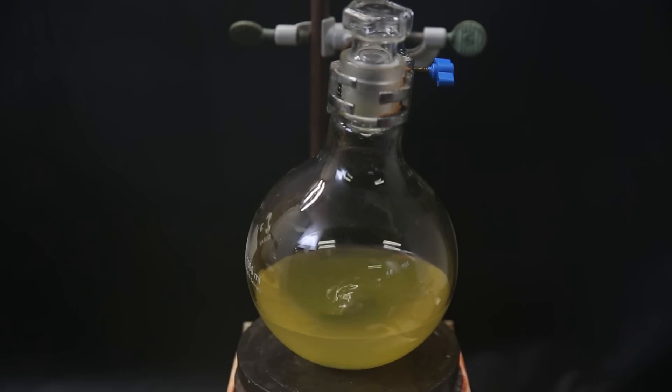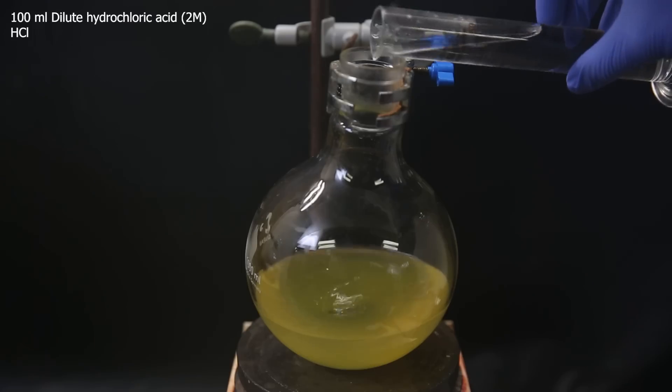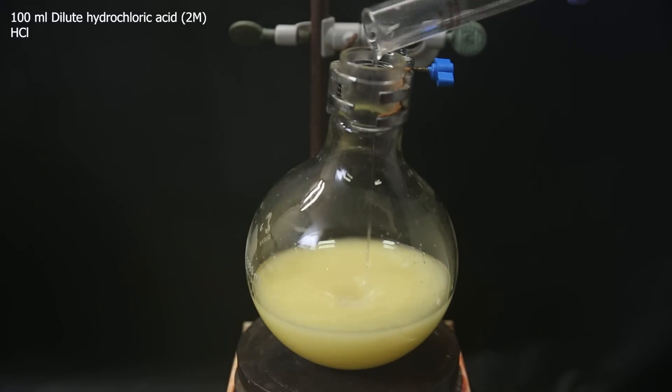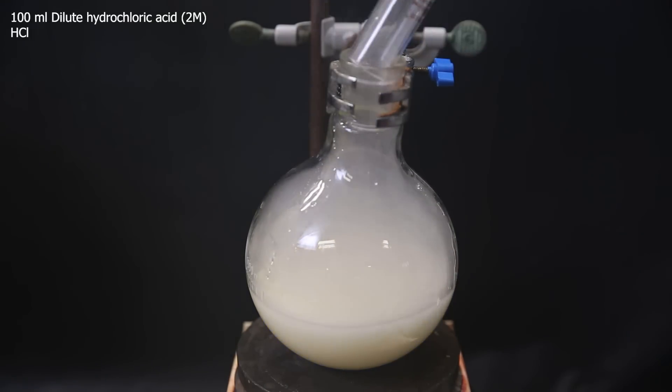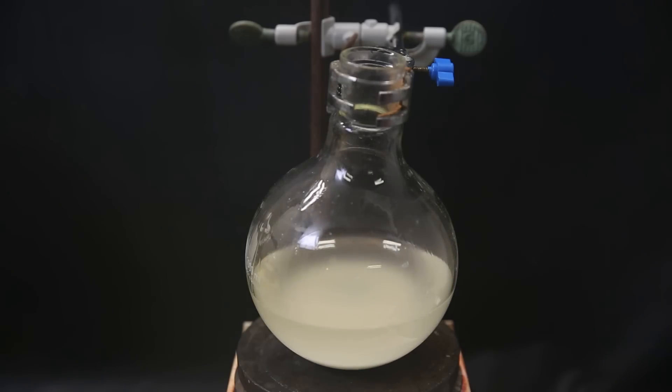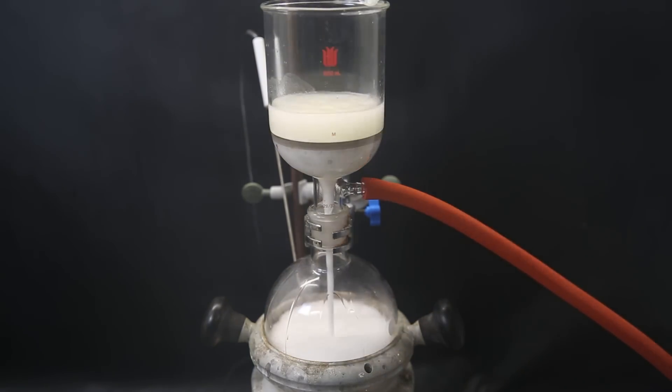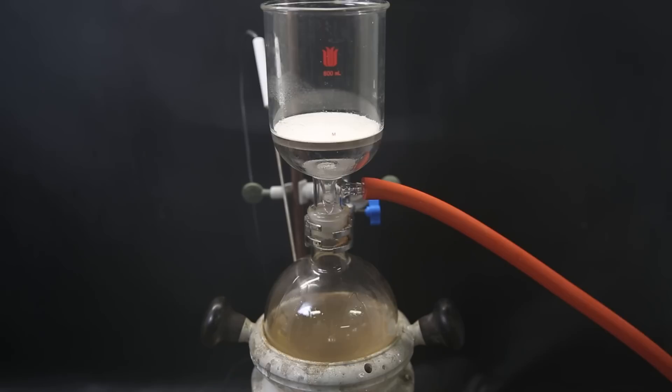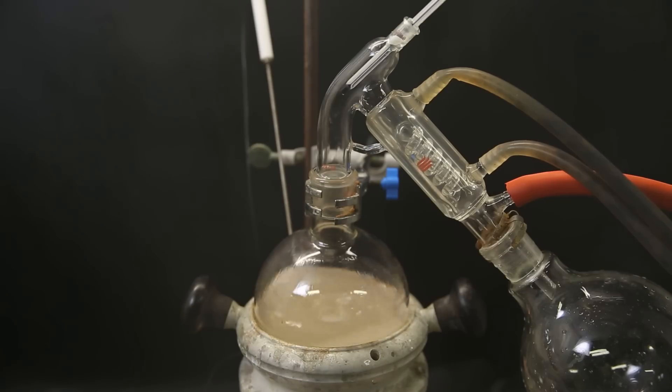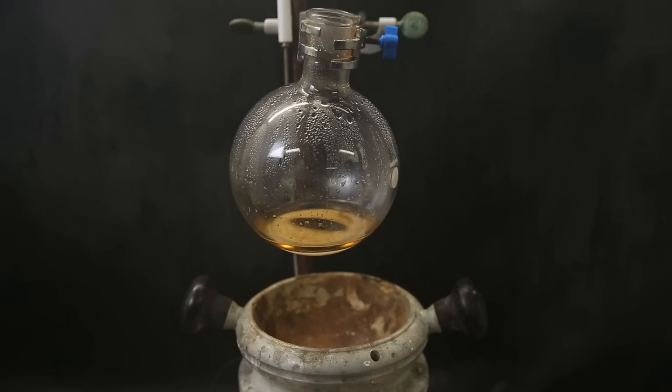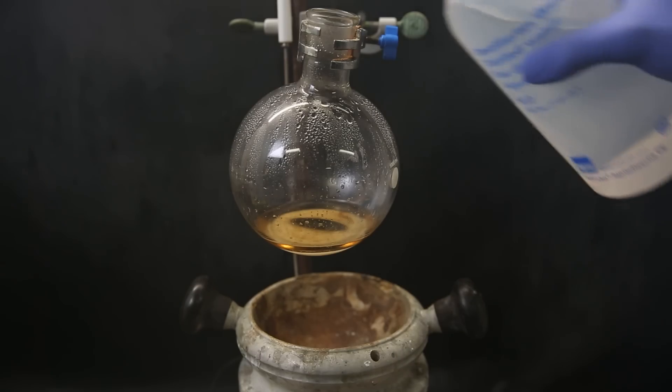When I return, it looks a little bit more green and hazy. I again quench the reaction with dilute hydrochloric acid, and some less soluble salts precipitate from the mixture. I set it up for filtration to remove the precipitated salts. And I then distill off all of the ethanol from the filtrate. When that's done, a yellow liquid and some water with salts are left behind.